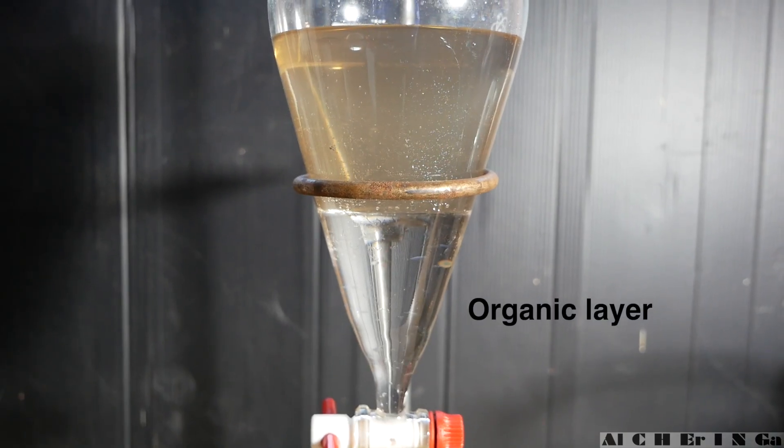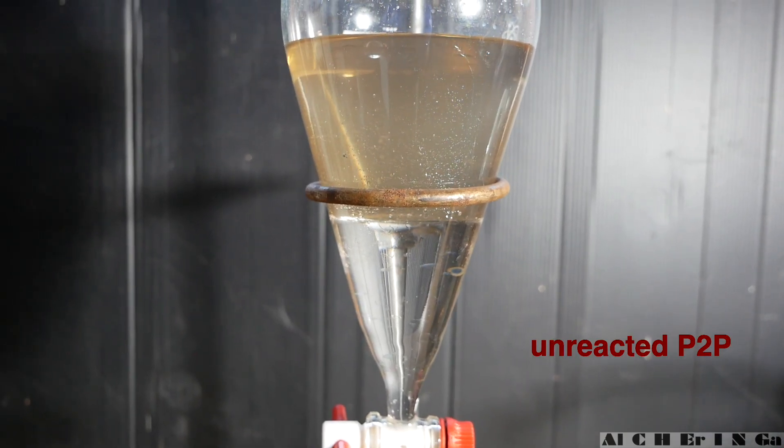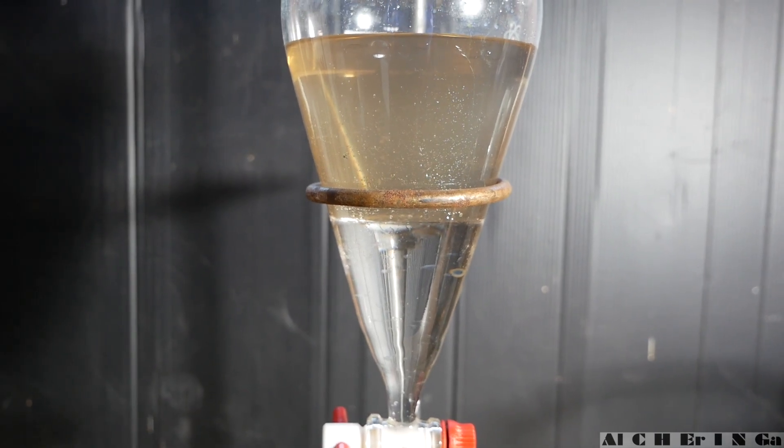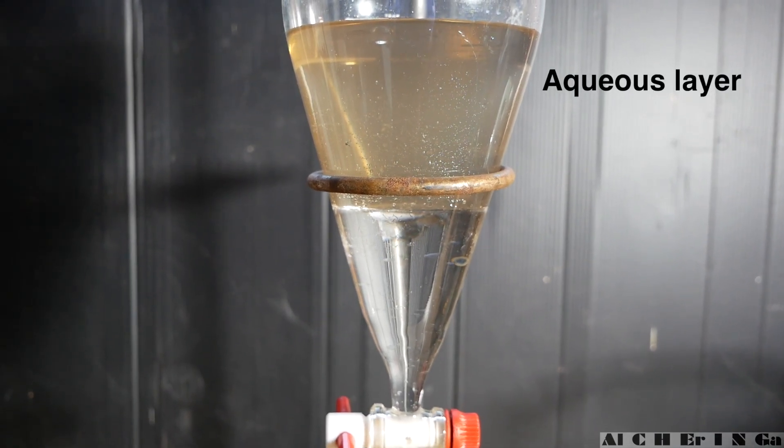The bottom layer is the organic layer which contains the unreacted 1-phenyl-2-propanone that we don't want. The upper layer is the aqueous layer which contains our product.